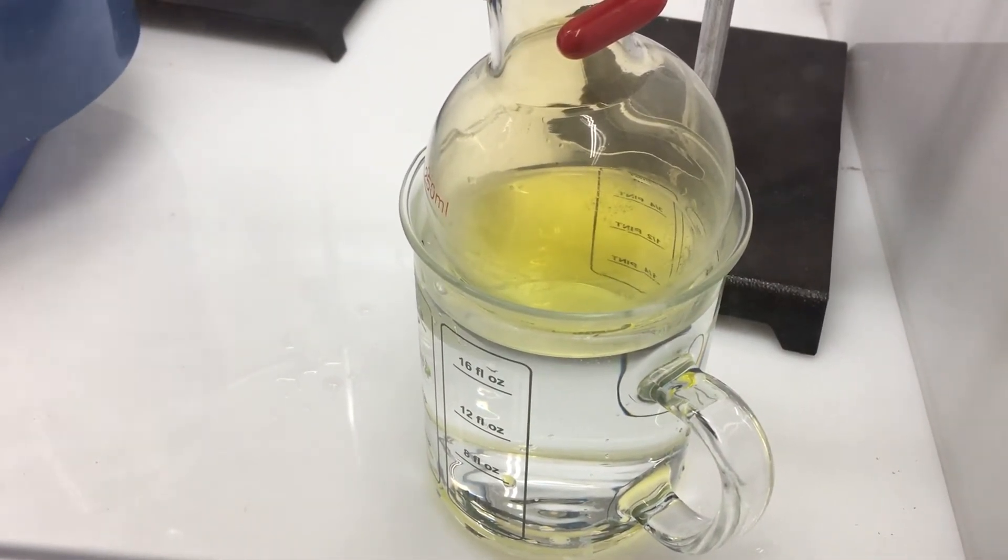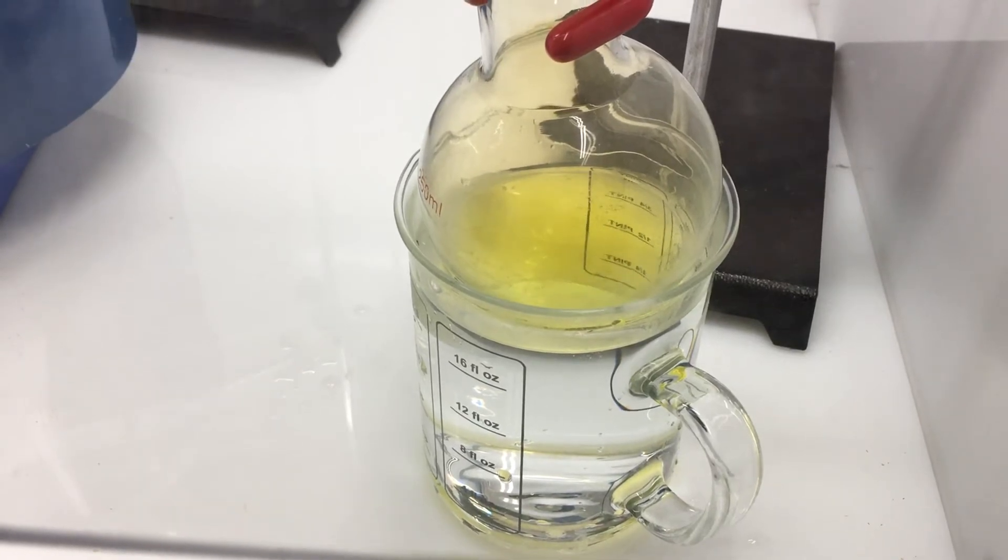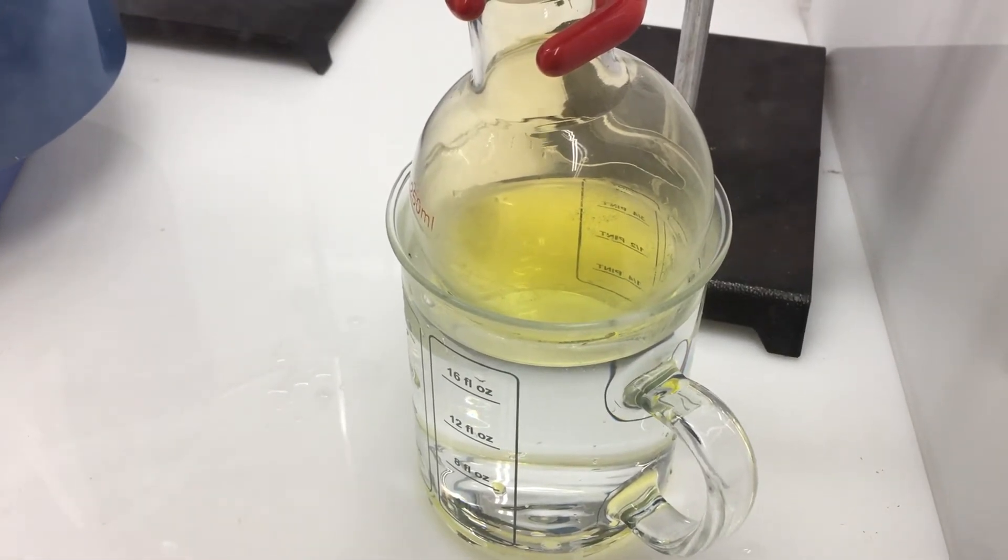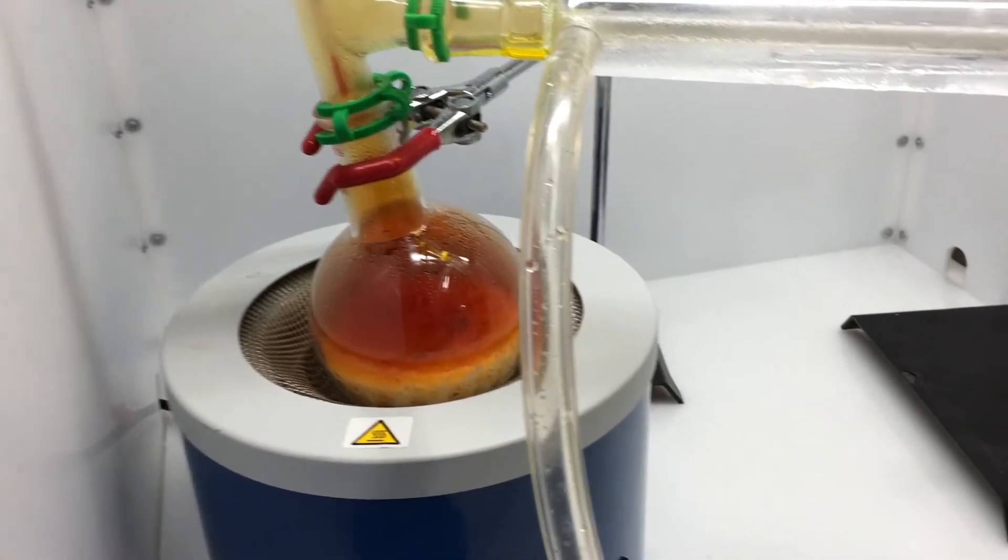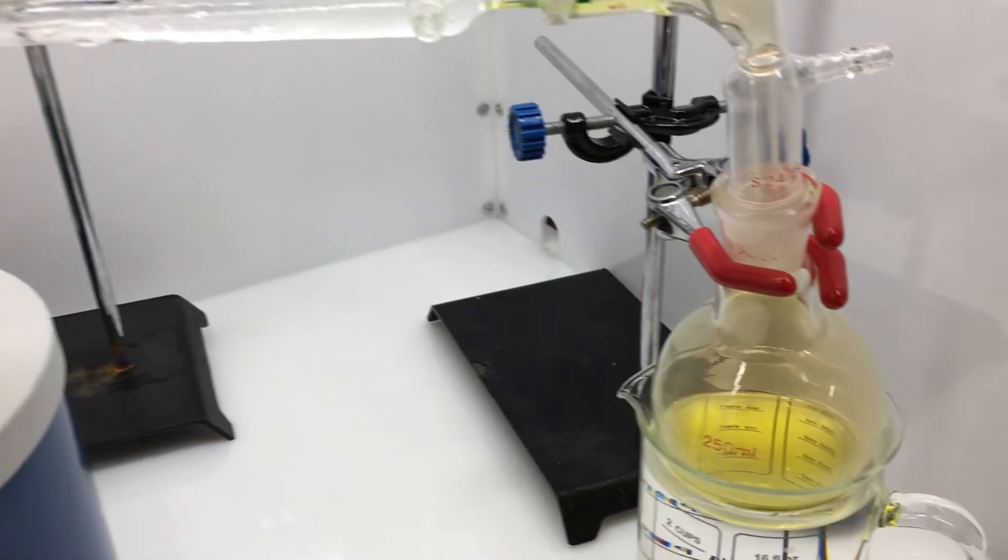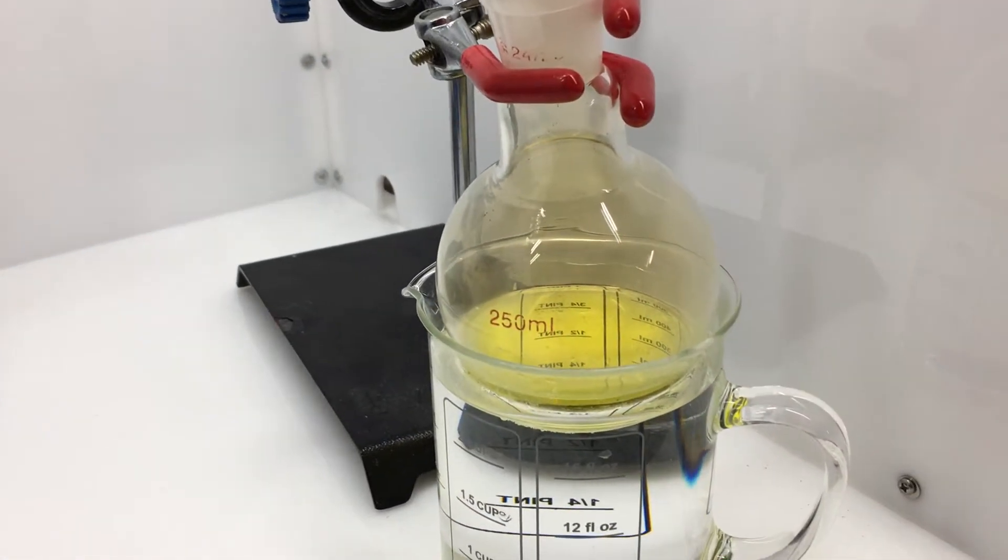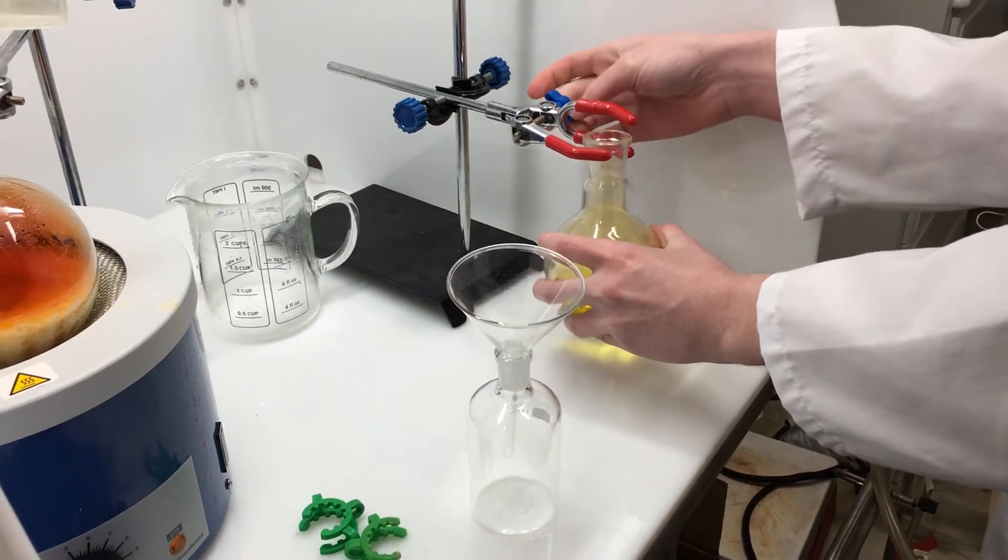It's probably a good idea to add a cold water bath or an ice bath to your collection flask, although it's probably not necessary as long as you can keep the column very cool. But if you start to feel the collection flask heating up, you should add one.